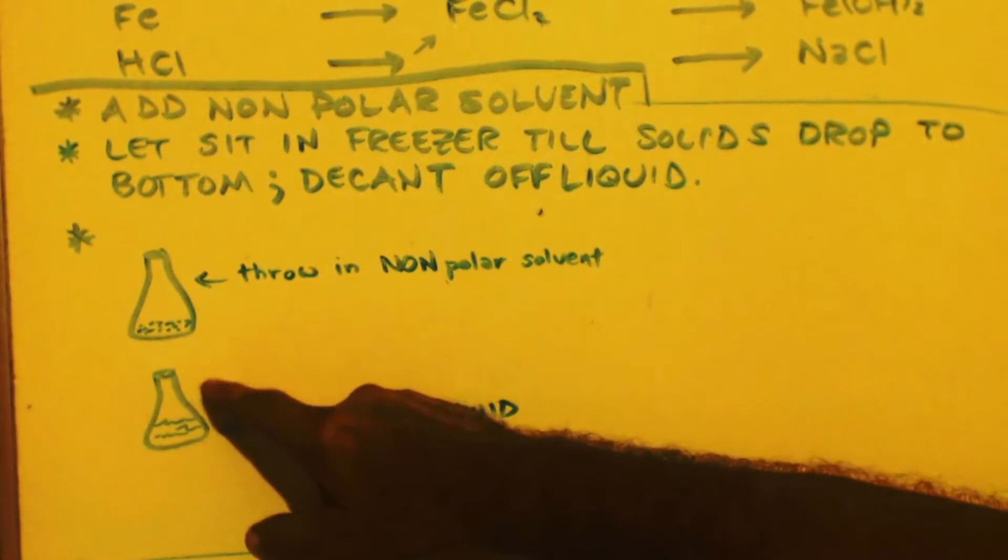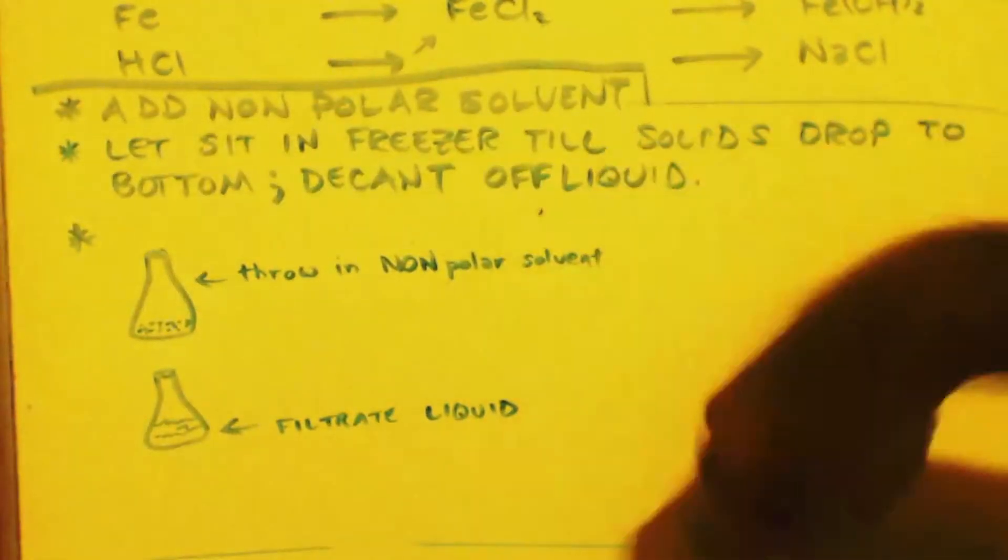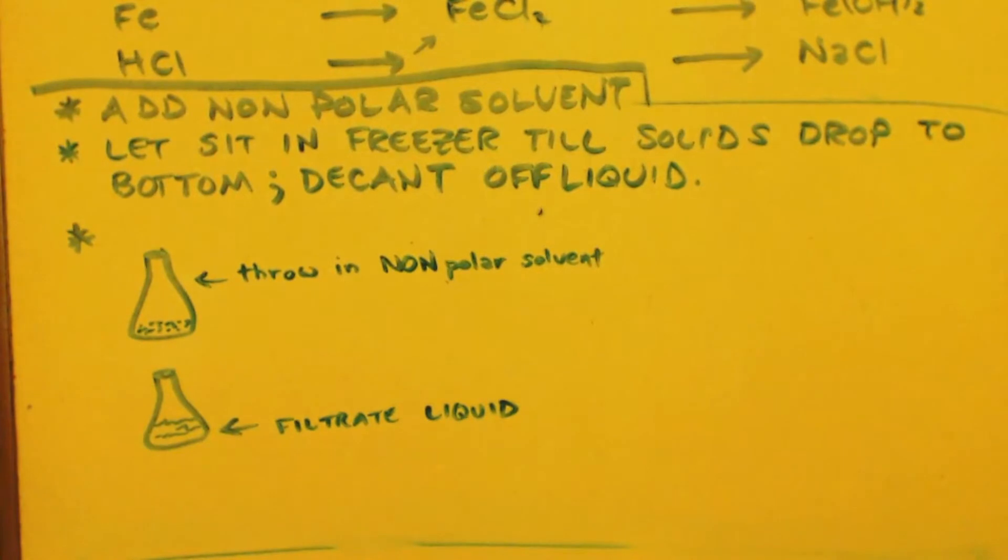Then decant it out into your mother liquor. And put some more non-polar solvent in there. Grab it and shake it up. Cover it back up, put it in the freezer. Repeat that process like three or four times.